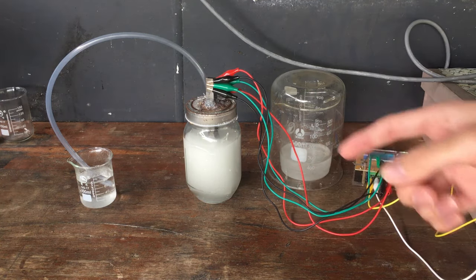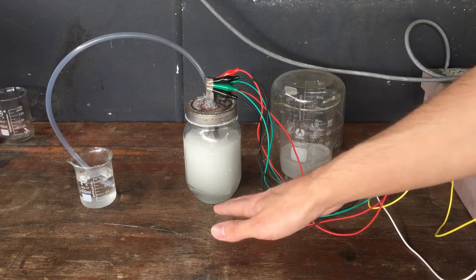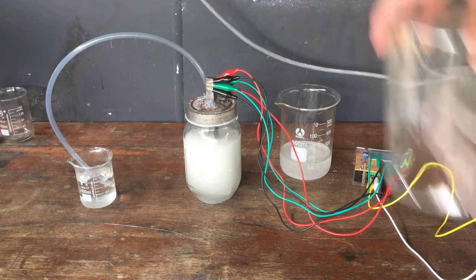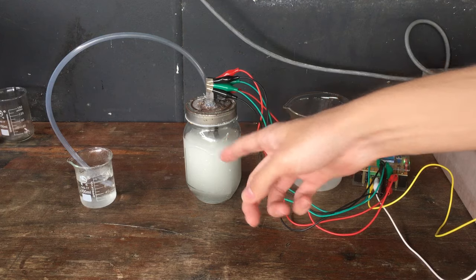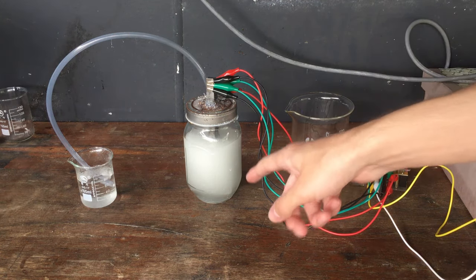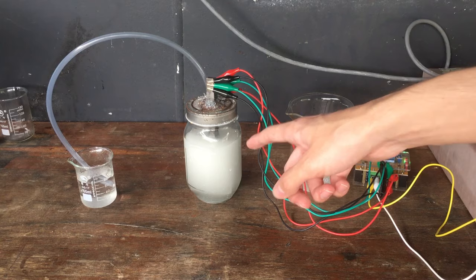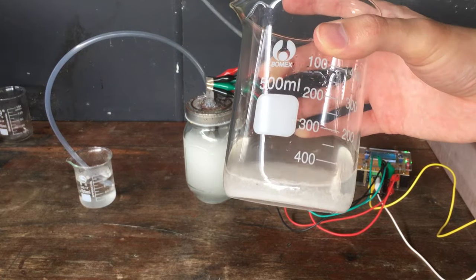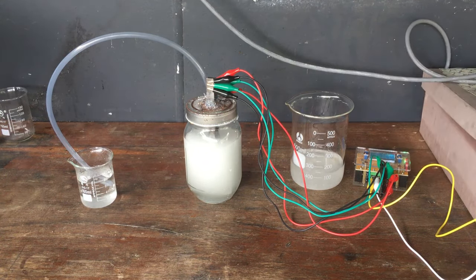Either way, about 10 days into running the cell, things were crystallizing out and starting to fill the cell with sodium chlorate crystals while there were still sodium chloride crystals on the bottom of the cell. So to make sure everything dissolved, I had to pour out about 150 milliliters of the cell into this beaker here, which I've stored off to the side. And then what I did is just added an extra 150 milliliters of distilled water to the cell, and that seemed to get everything all dissolved. Over time I periodically switched between the solution that was in our cell and the solution that was in our beaker over here in order to ensure that we were electrolyzing all of the chloride content that we started with. And you can see over time in our external beaker we have actually crystallized quite a bit of chlorate, which is very promising. There should be quite a bit more in solution, which we will eventually get out.